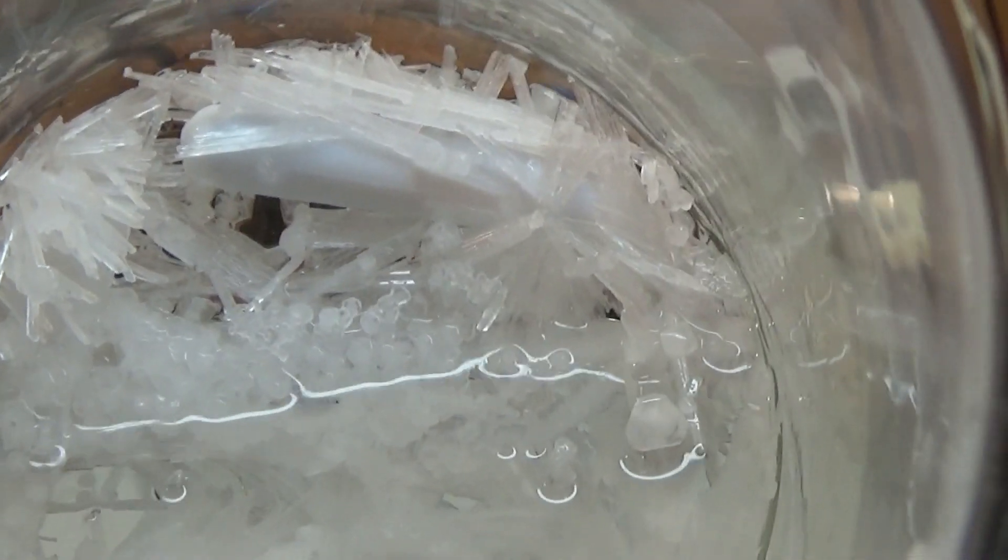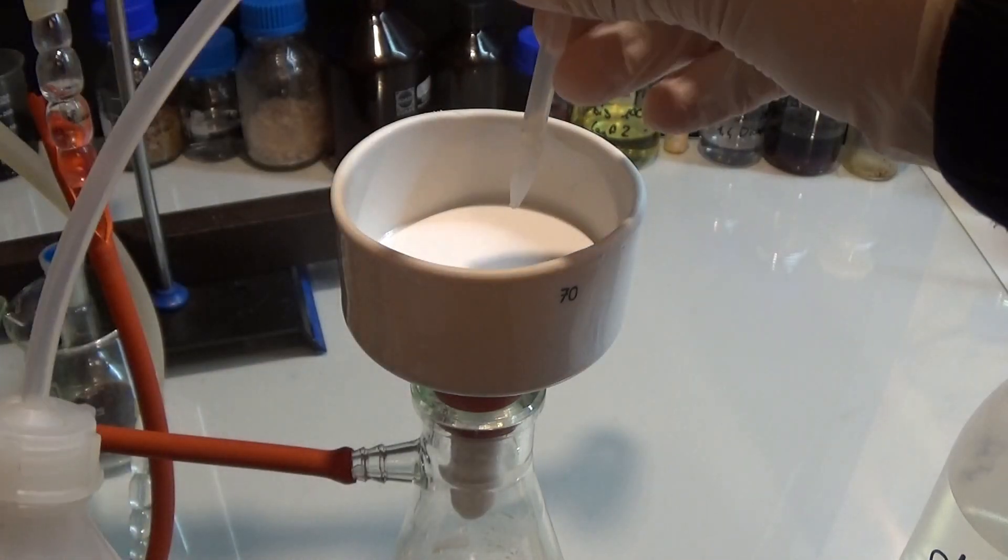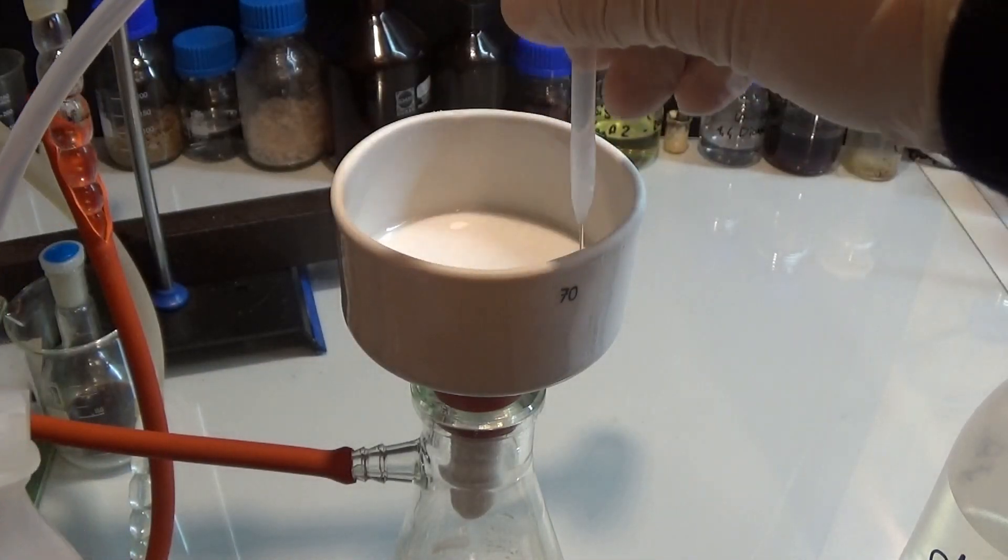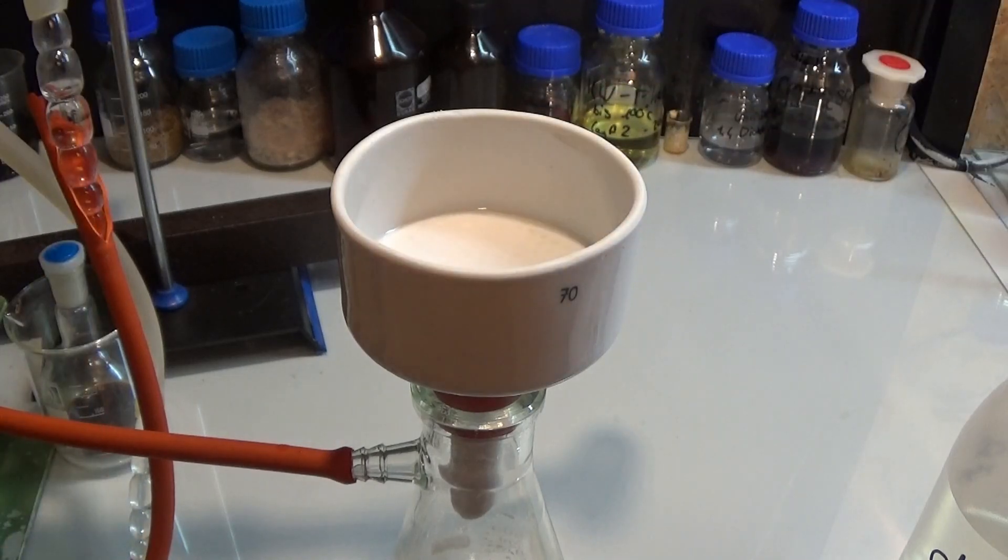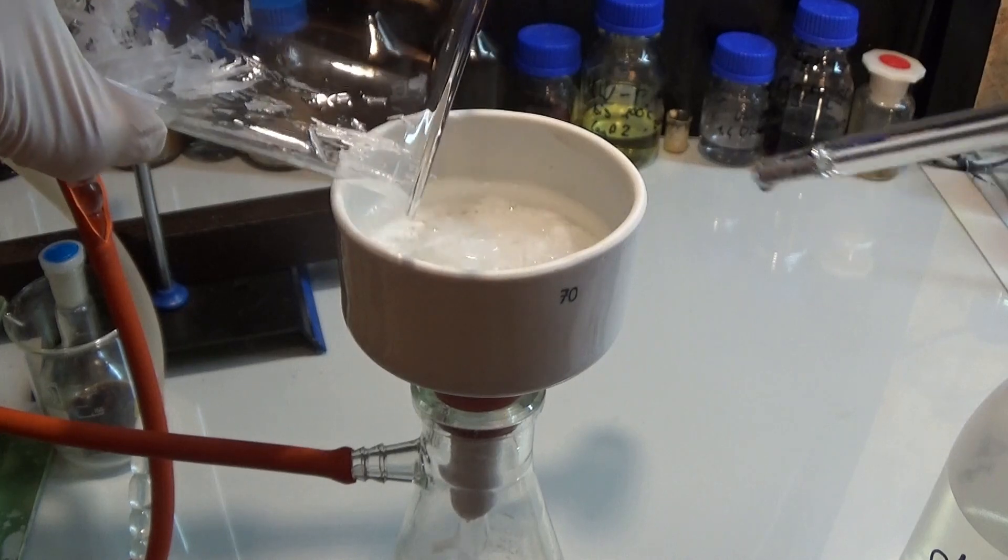Now we wet the filter paper with some ethanol and start filtering our crystals off.